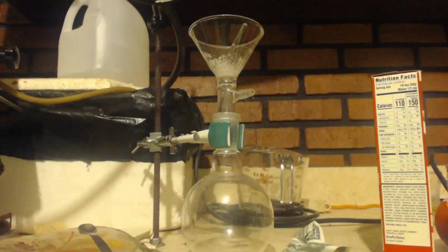That's how you learn. Now when I make the nitroethane, I have to heat up the pot up to 120 C. So my hope is that using this sodium ethyl sulfate that has this ethanol attached to it in its crystalline lattice, when I heat it up, that will break apart and the ethanol will distill out first.